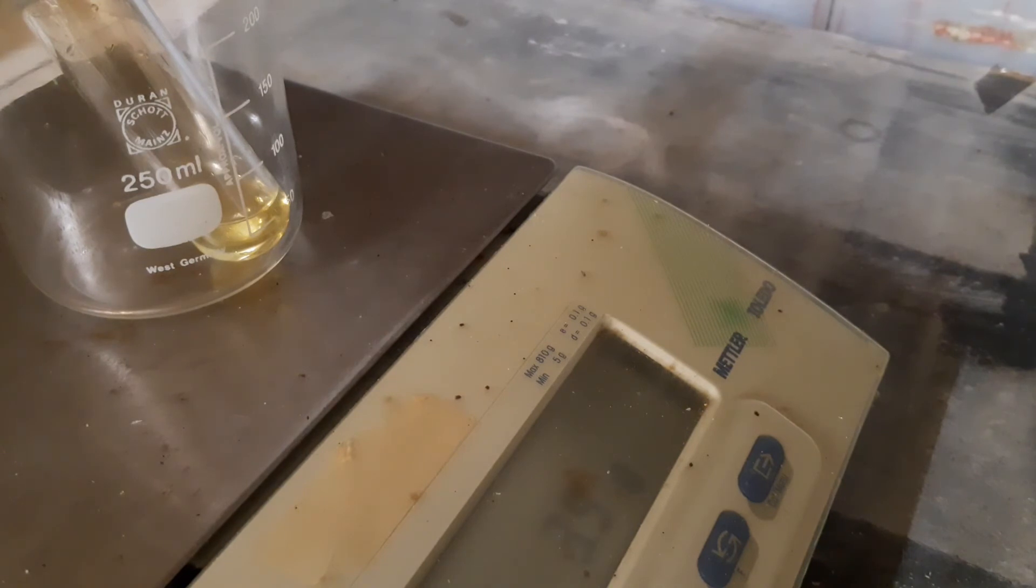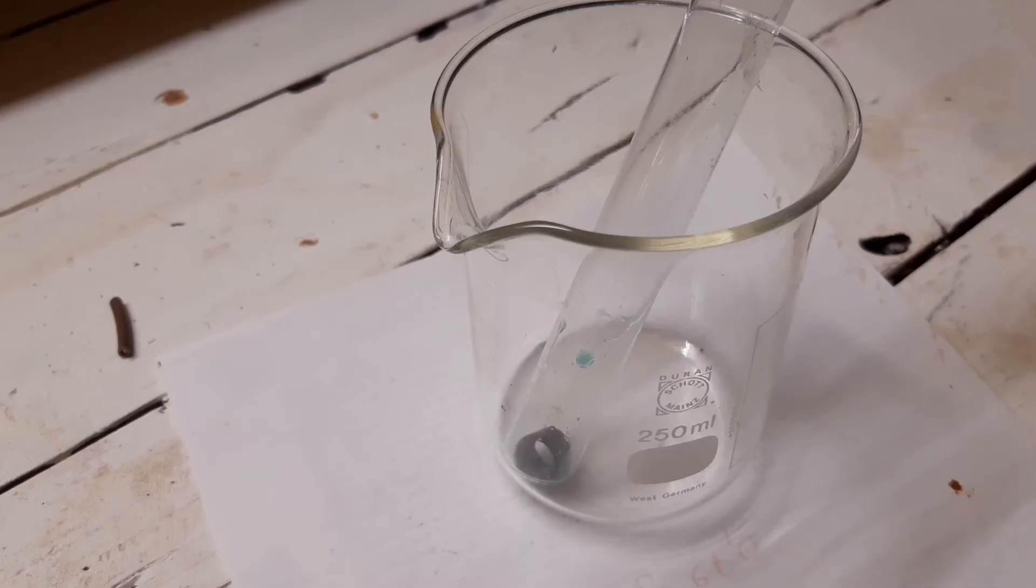Since I lost my analytical balance a couple years ago on a move, sadly, I'll have to test the concentration instead of weighing it—because it's much easier, but the scale just isn't accurate enough to do it.